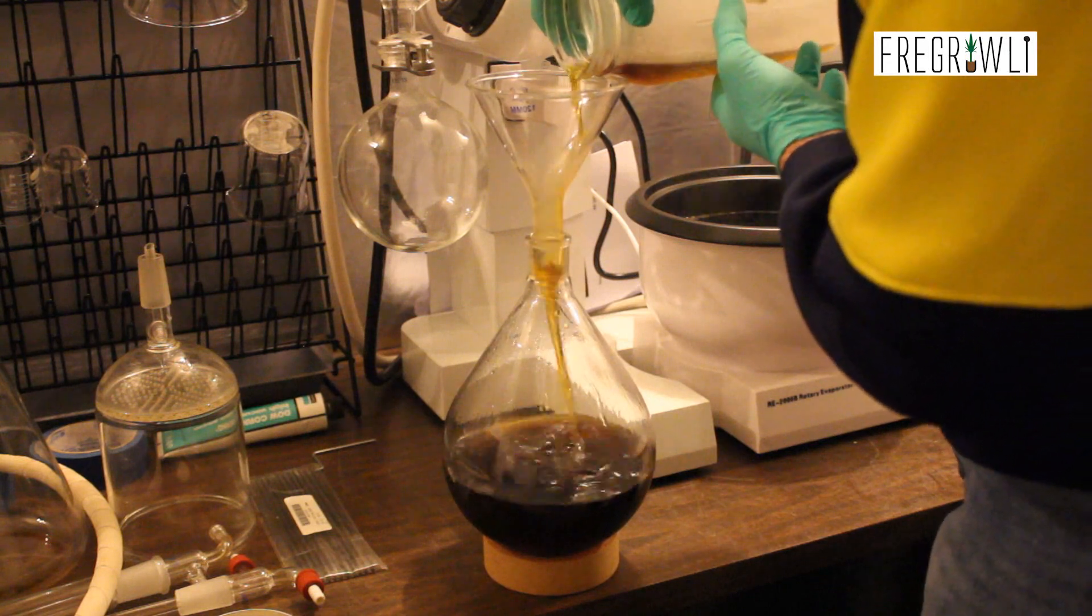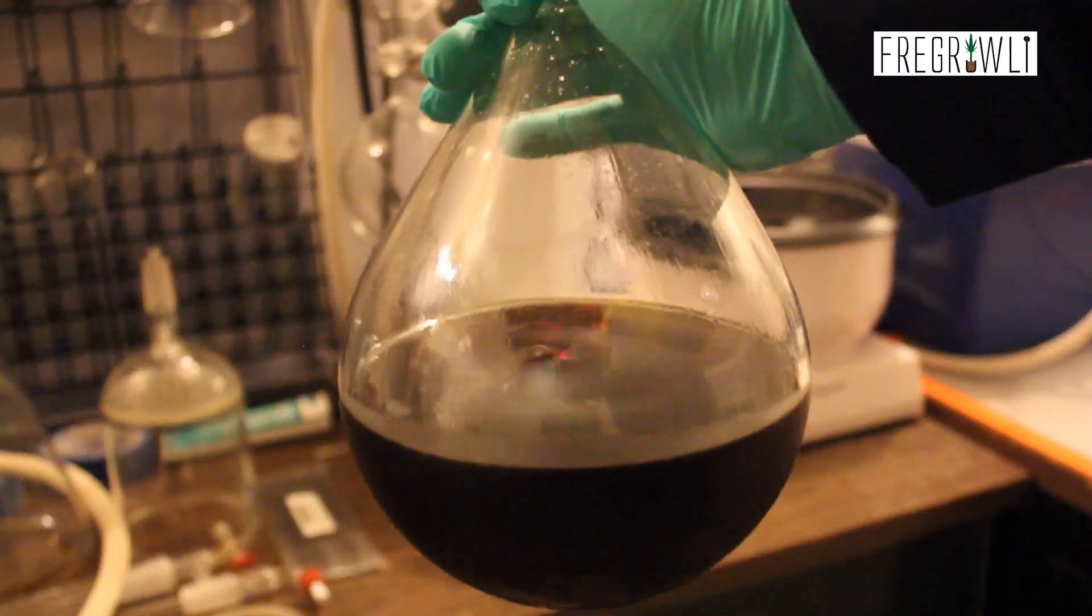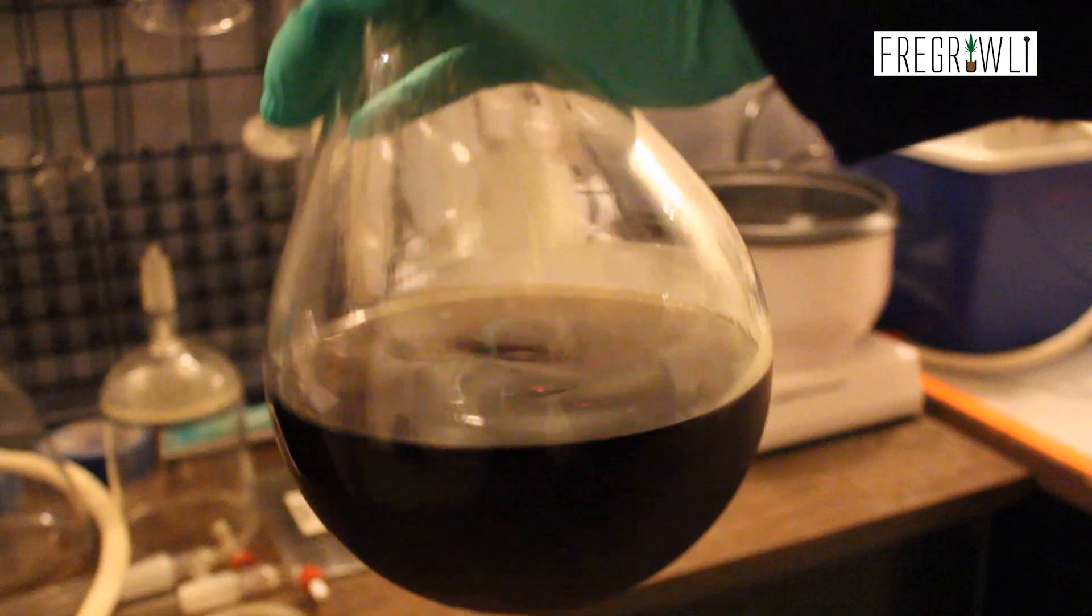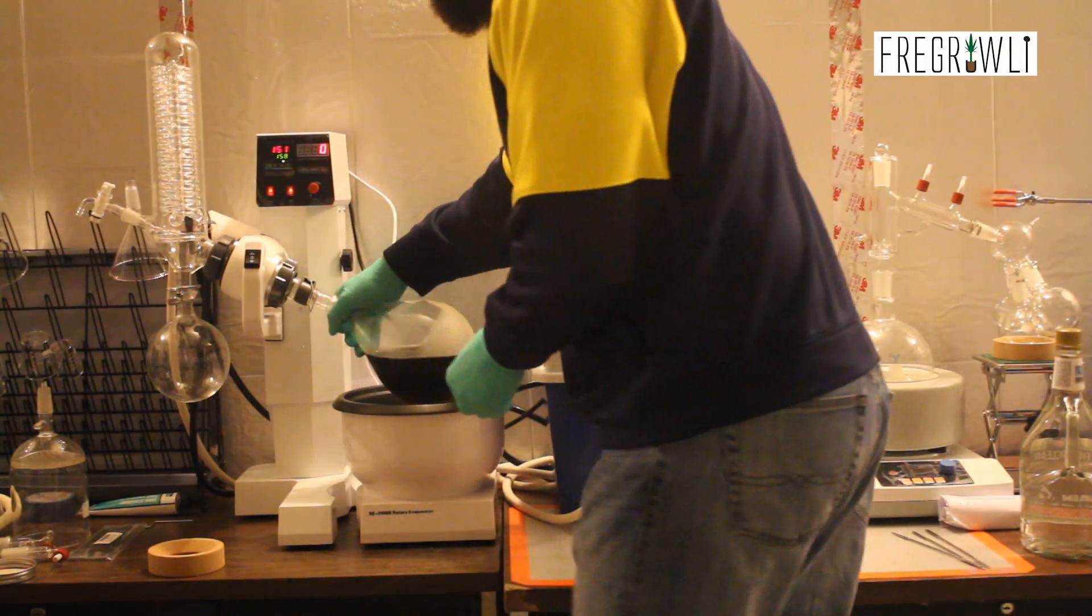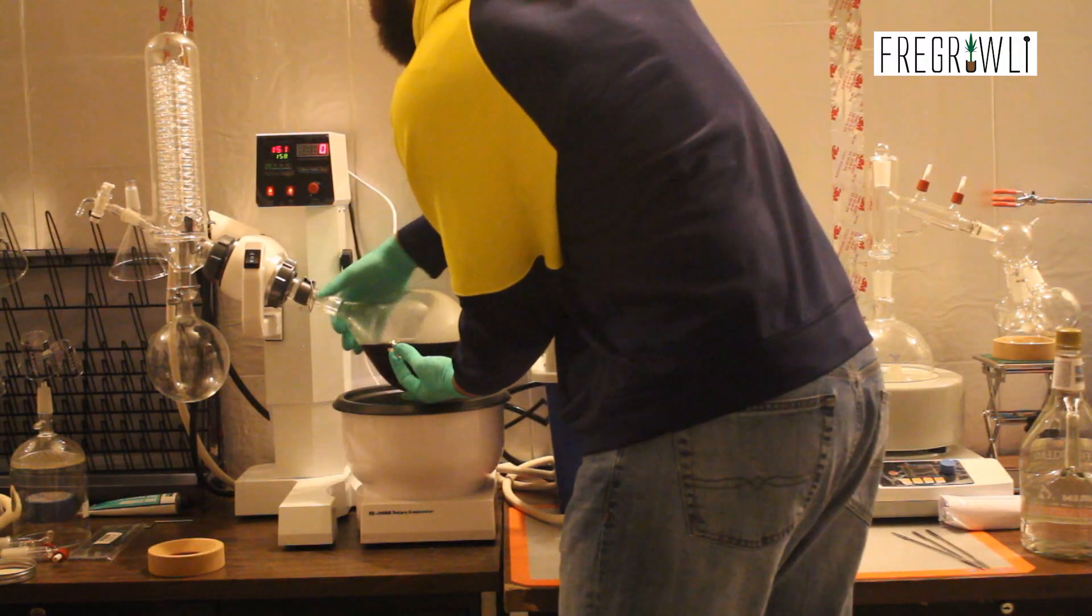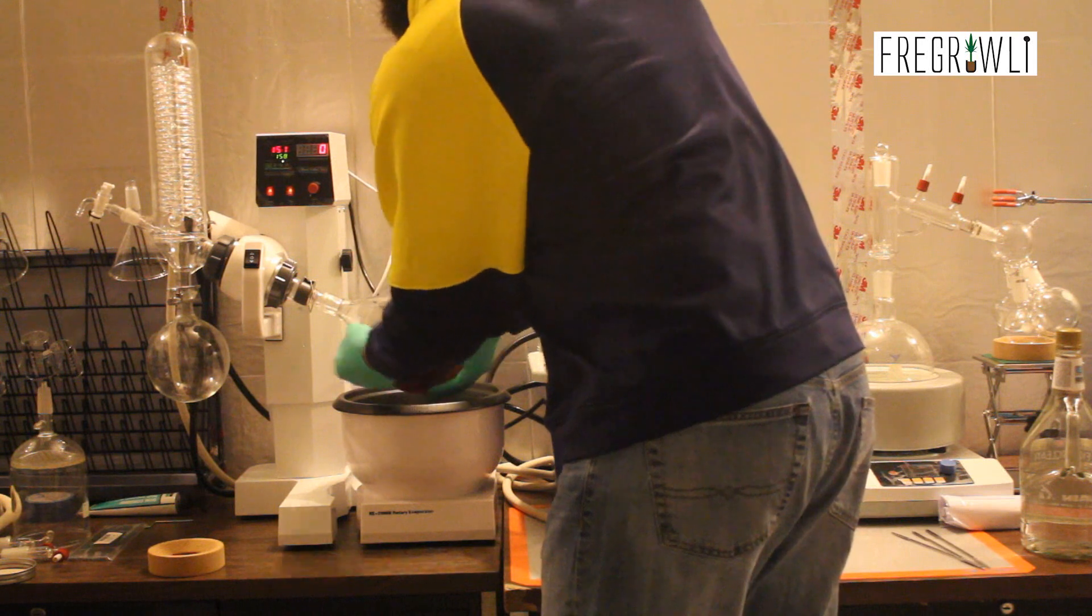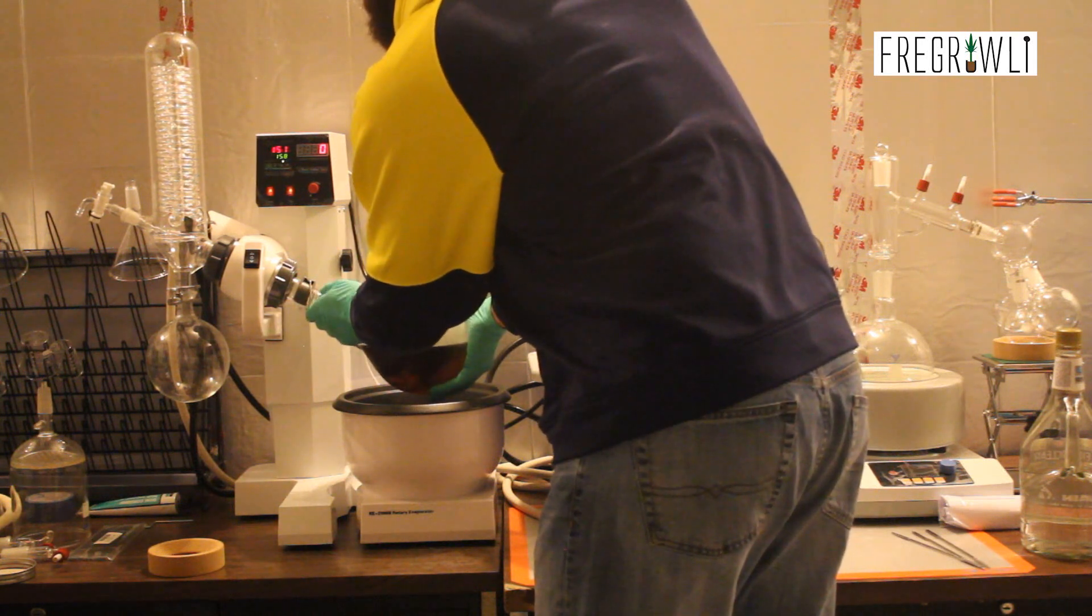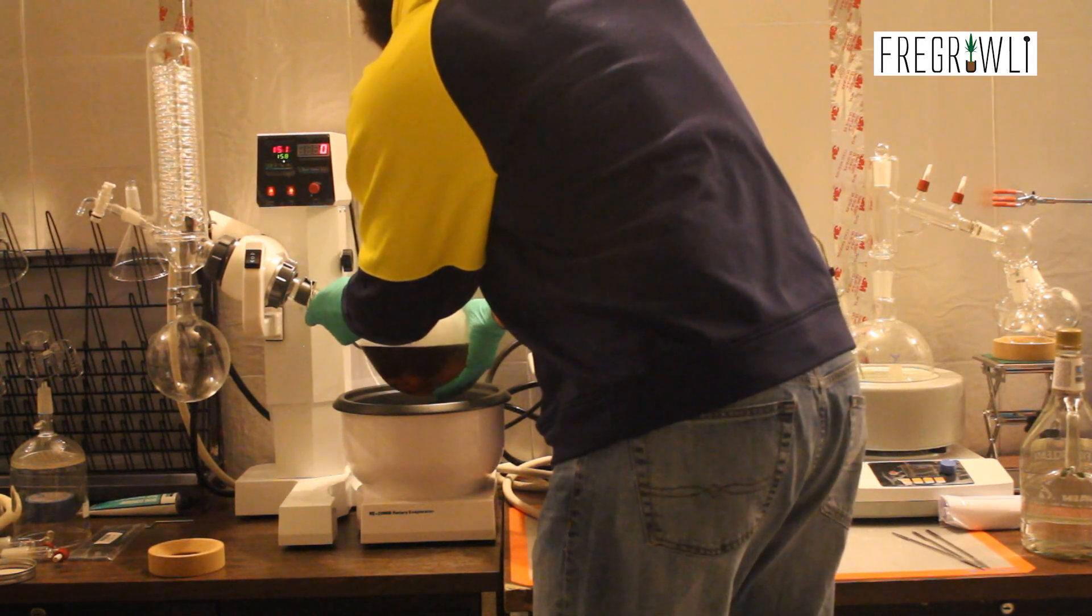Carefully connect your evaporation flask to the receiving end of the rotary drive and carefully secure it with the provided clip. Double check and make sure your clip is securely attached before lowering or turning on the motor to ensure you do not break your flask and ruin your material.